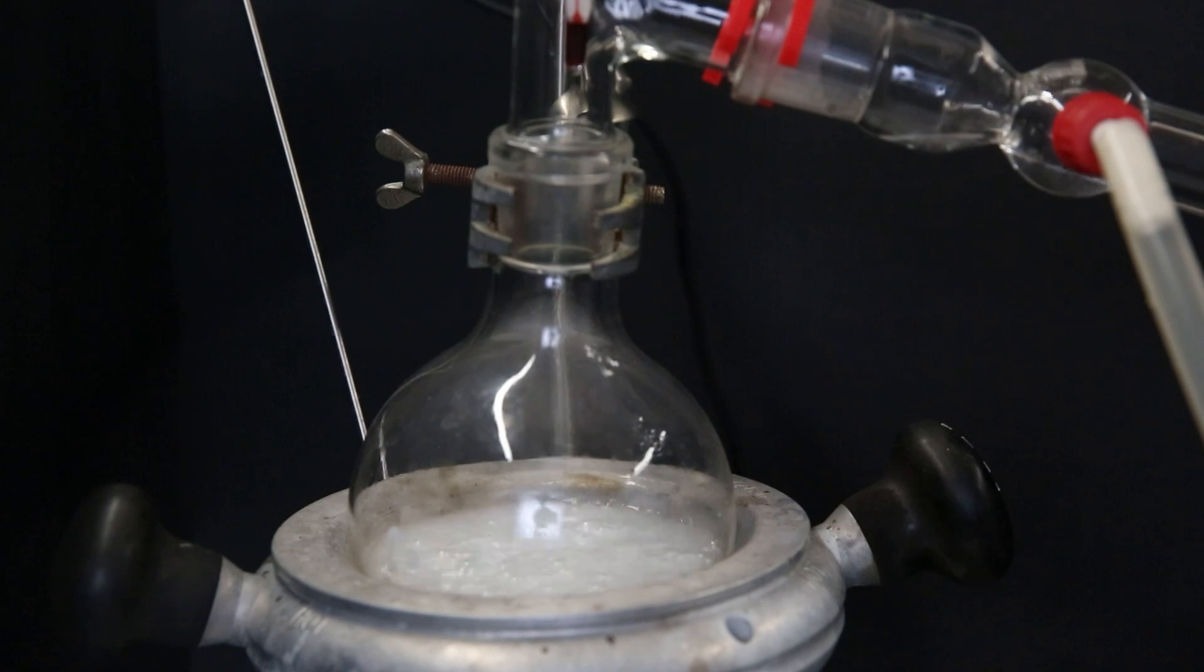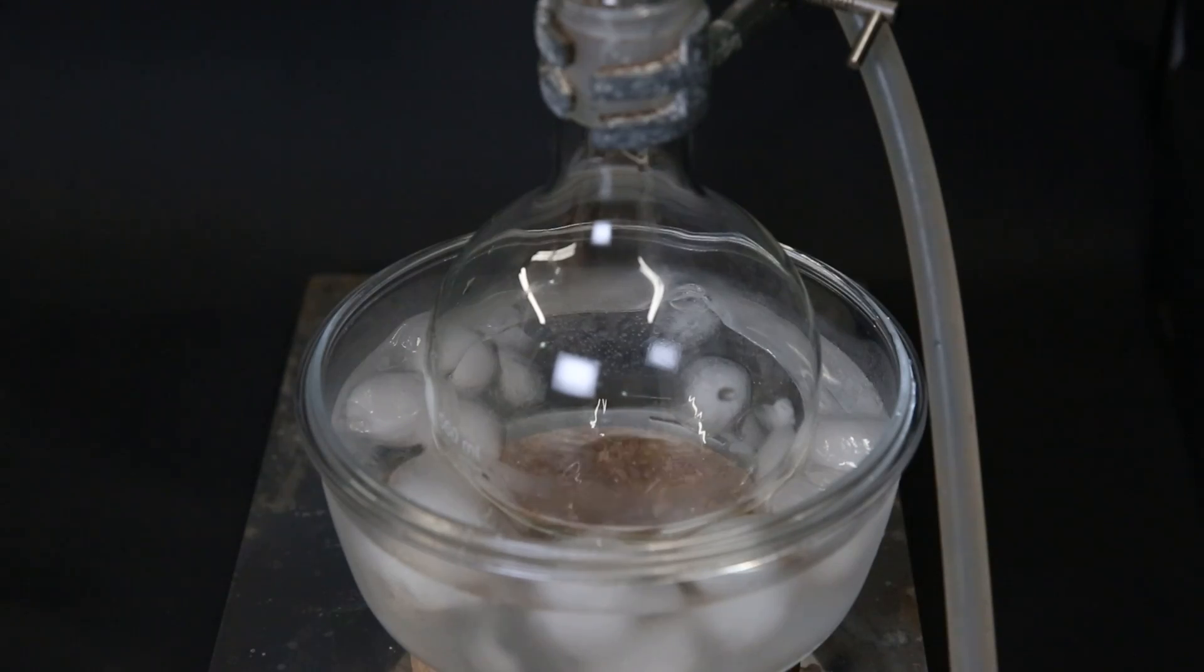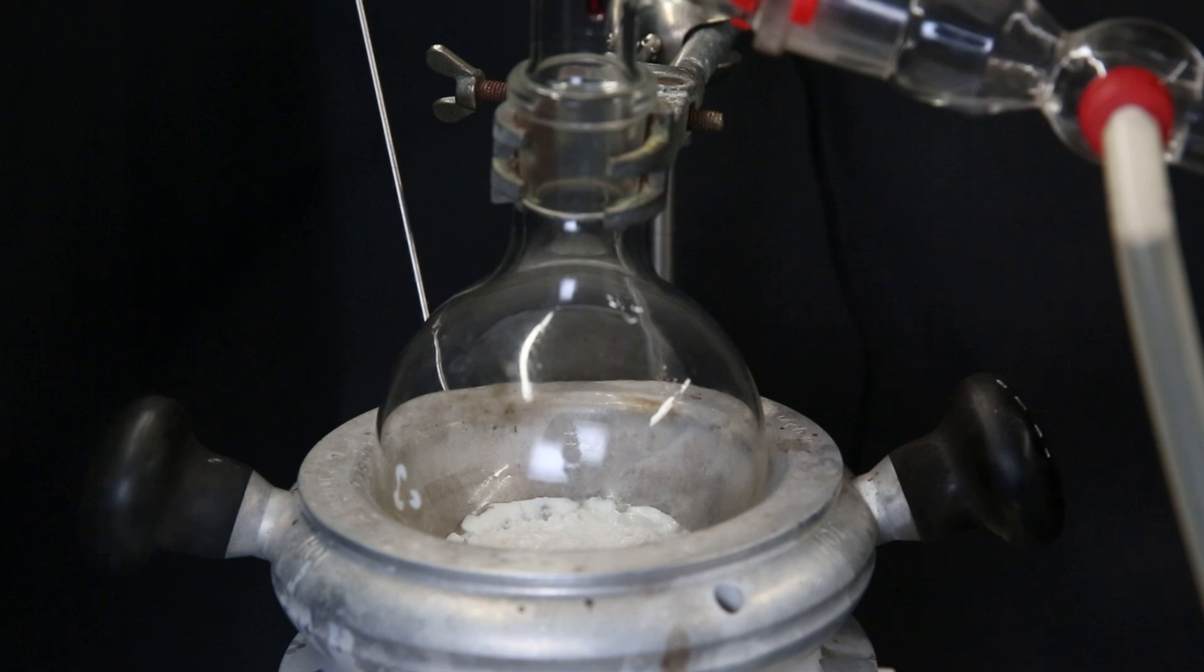It quickly started to boil and the diethyl ether started coming over in the receiving flask. After a while, the flask is almost dry and not much more is coming over, so I stopped the distillation.